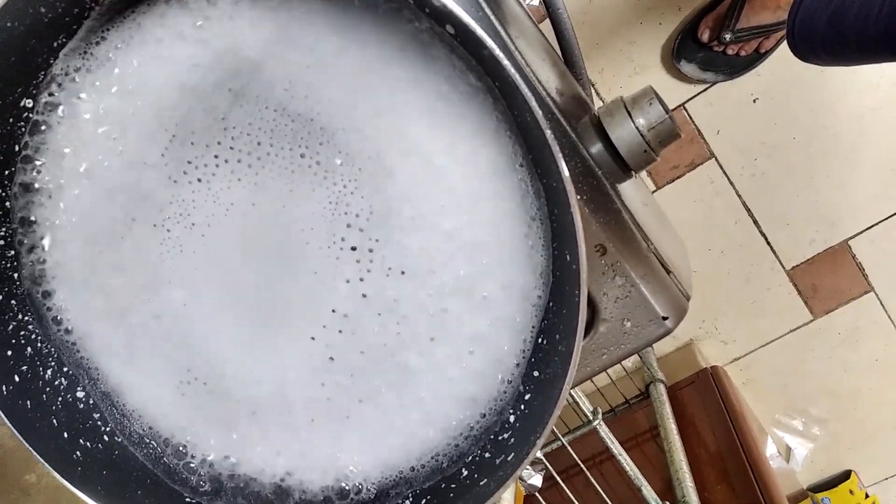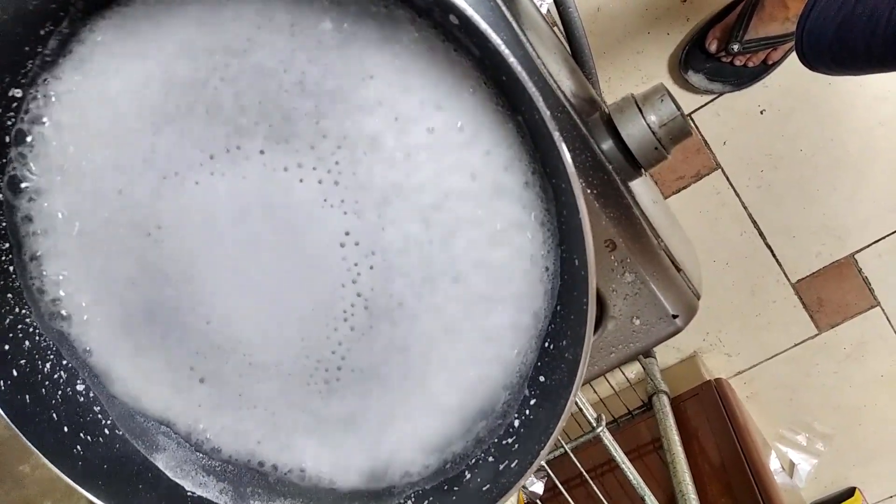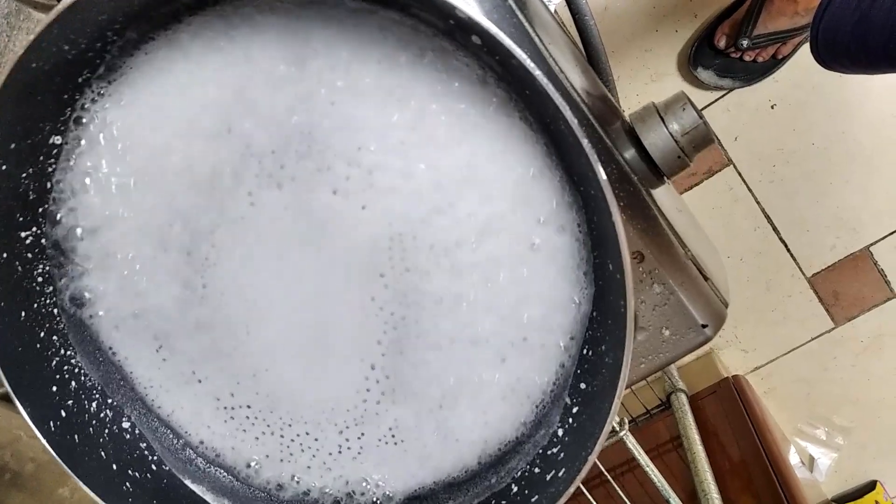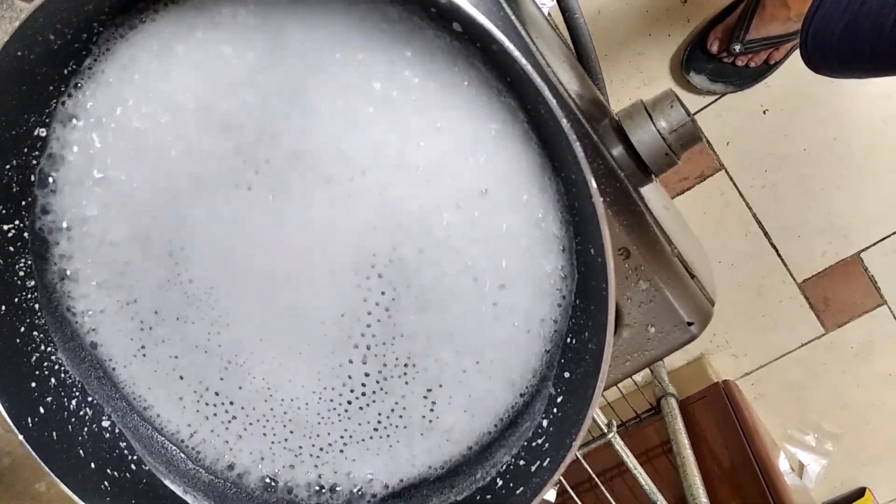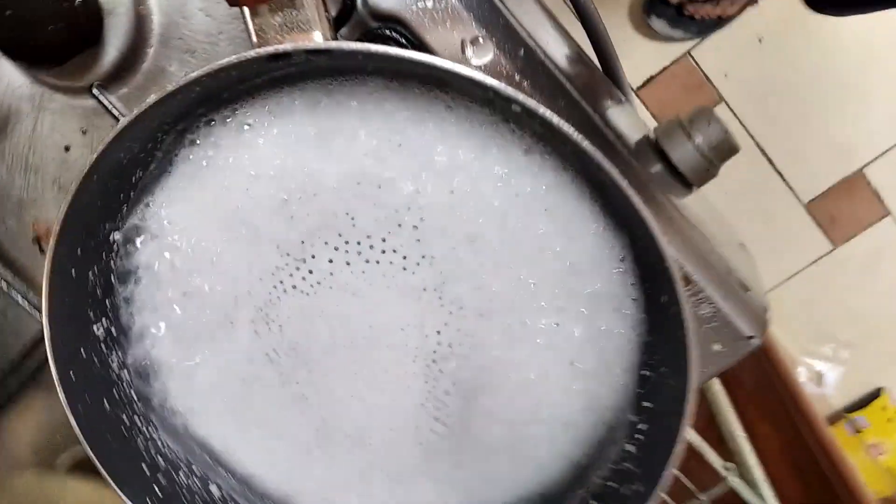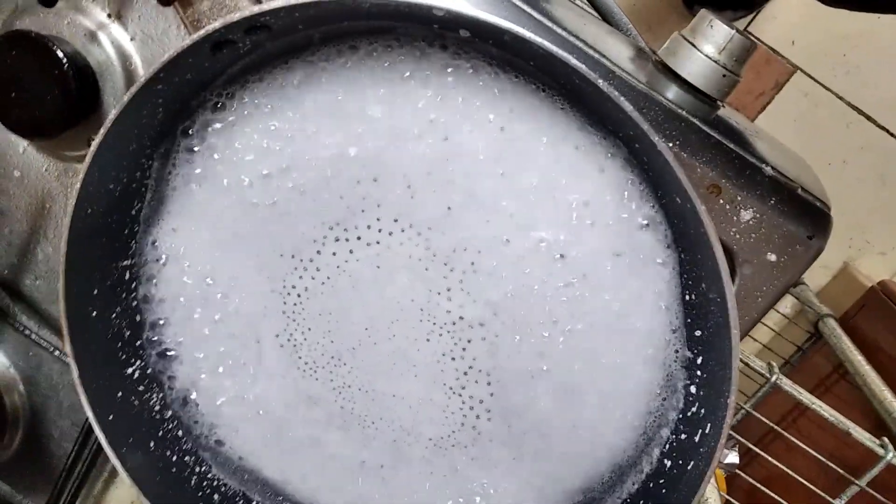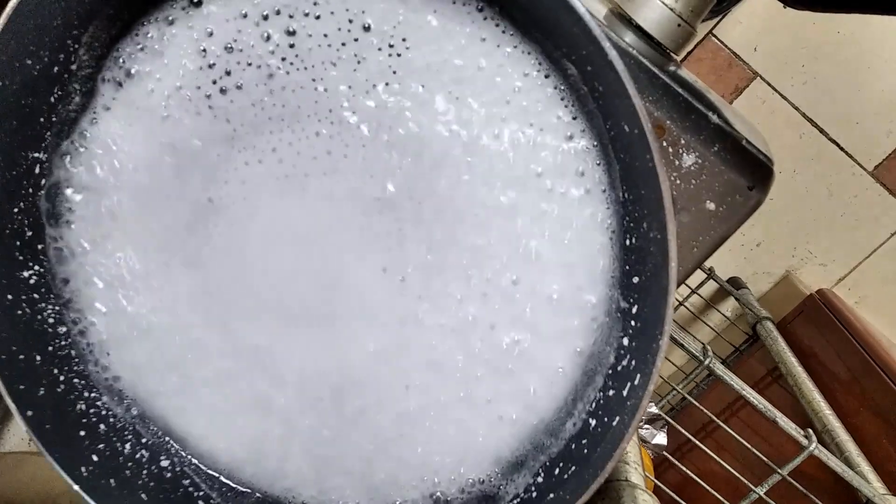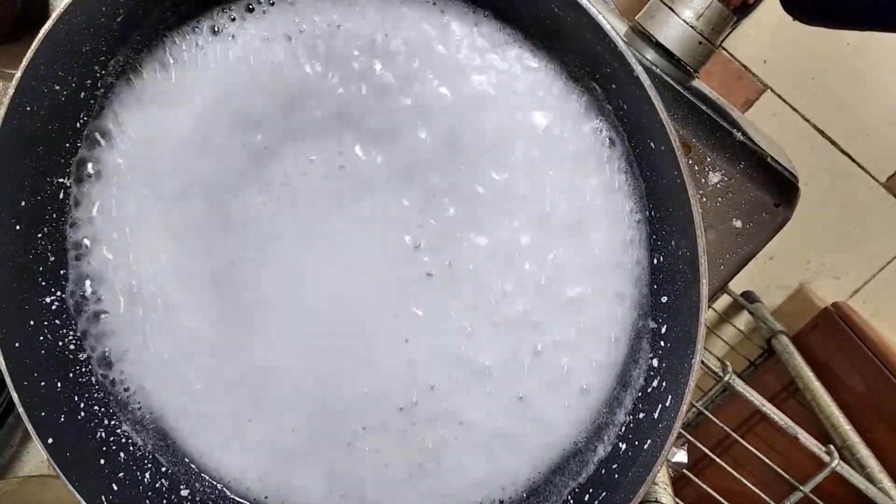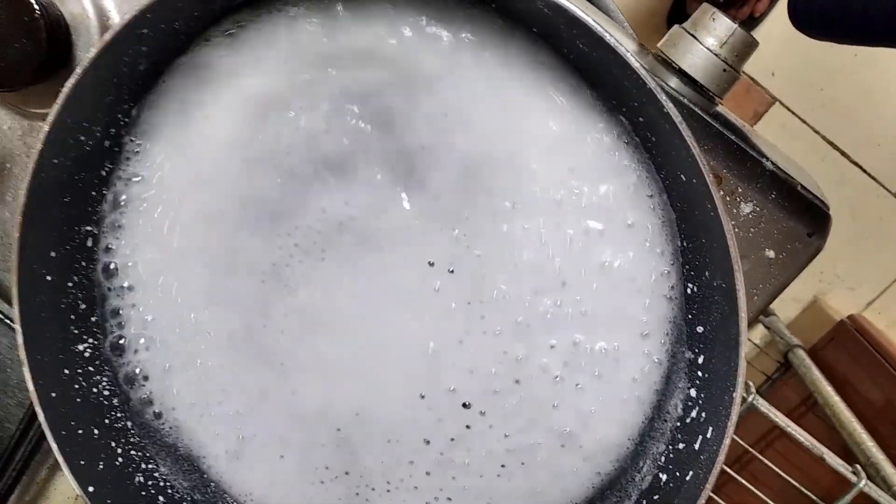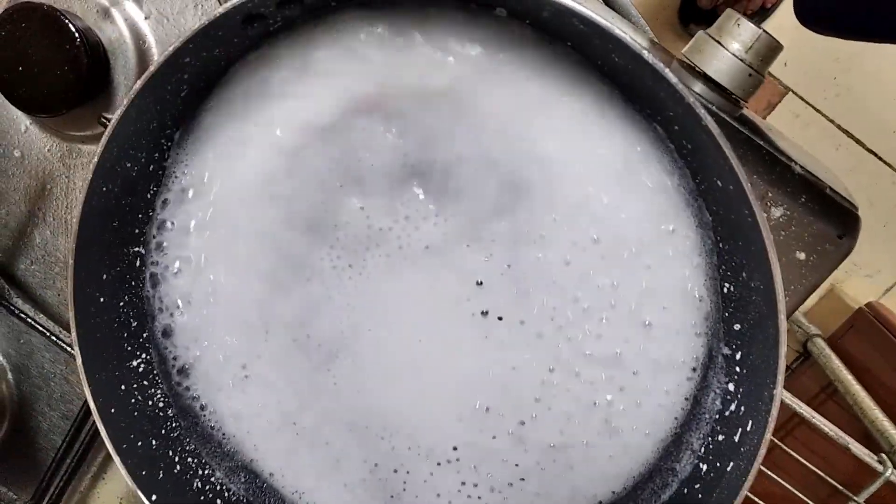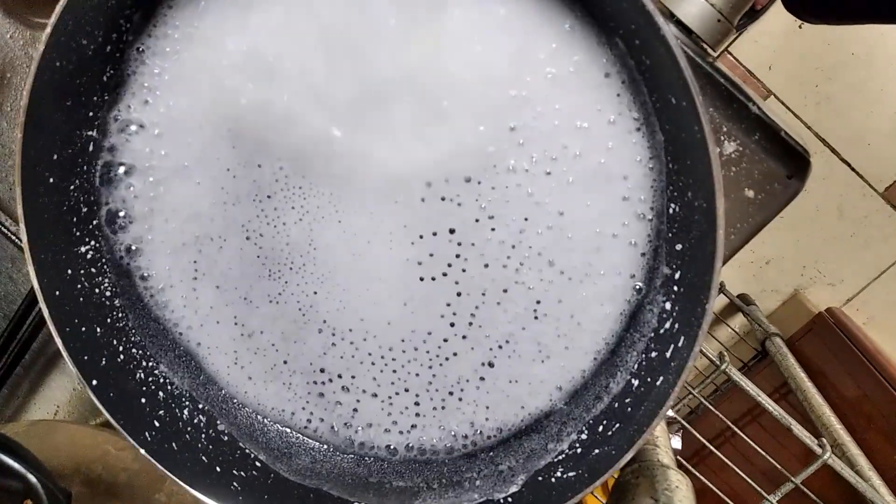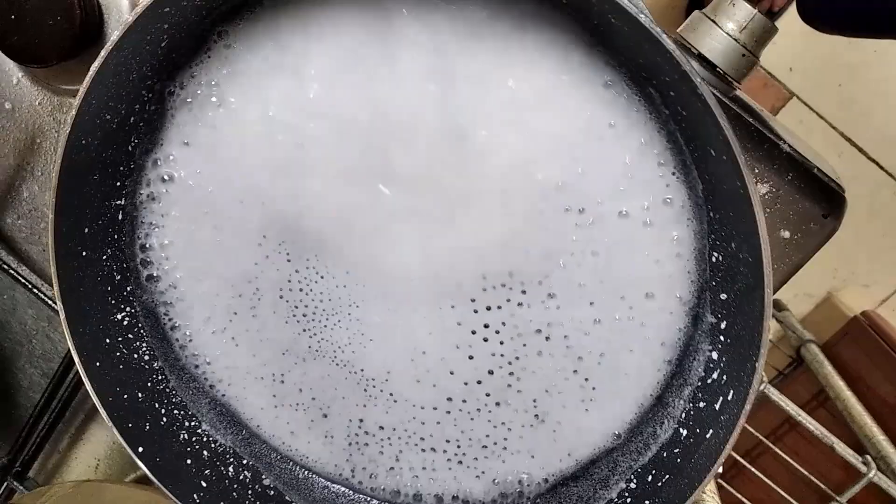Yes, this water is horribly bitter as compared to the salt below. This is how they actually extract it before selling. Good thing these guys did not do that. Honestly that's good for me, because doing it this way means that I can essentially use this as my pH control substance, so that I can control the pH of the cell a lot better.